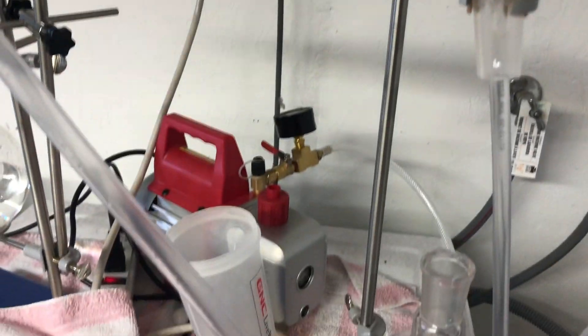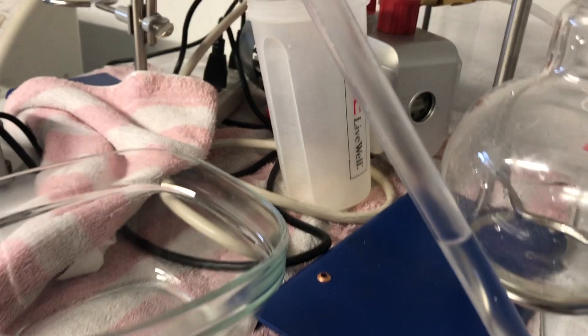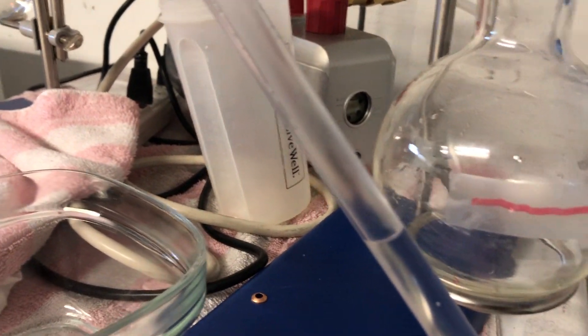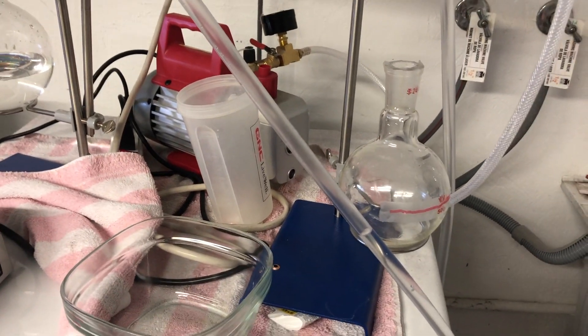Fractional distillation tube here. Condenser. And then we dump the remain into this side over here. I also marked off about 300 milliliters here so I have a good idea of how much to expect.